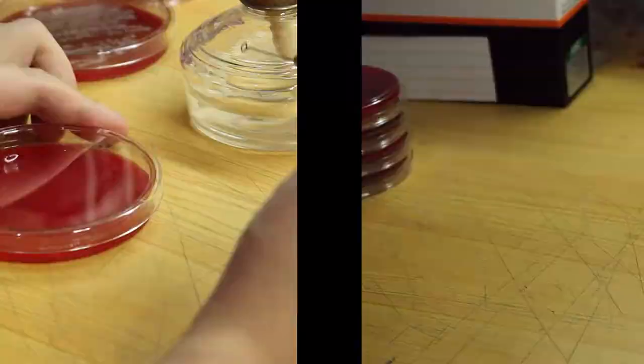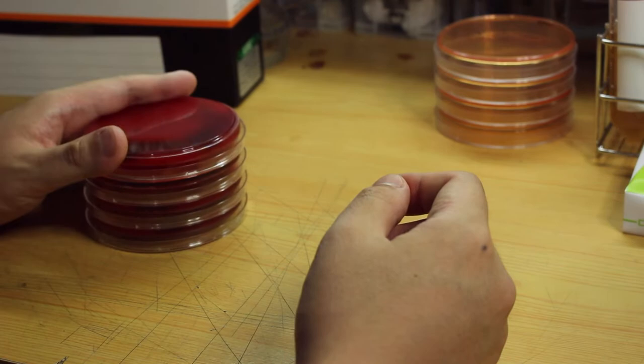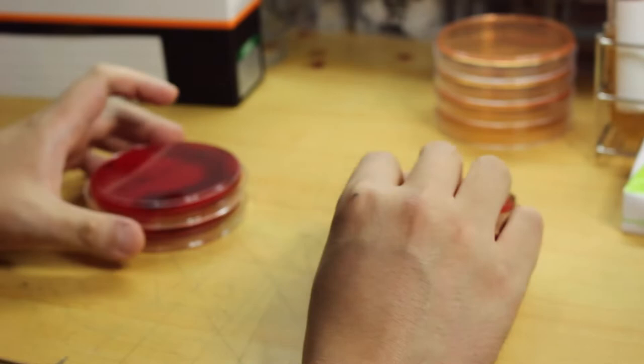Here I have four pure samples. I mark them as S1, 2, 4, and 5. Don't ask where the three goes. I'll pick the colony one more time to make sure I have enough bacteria for the next step.